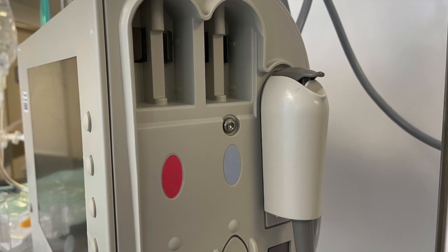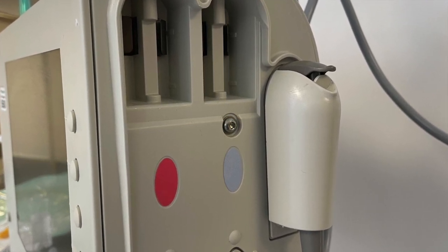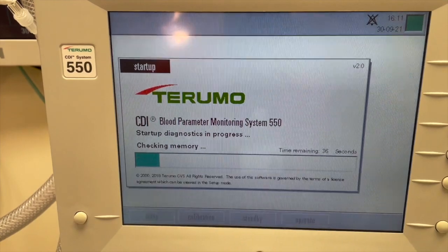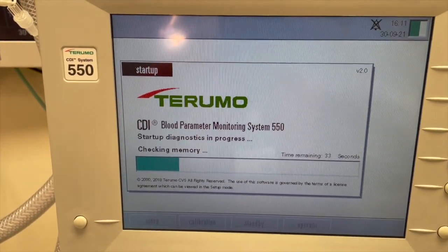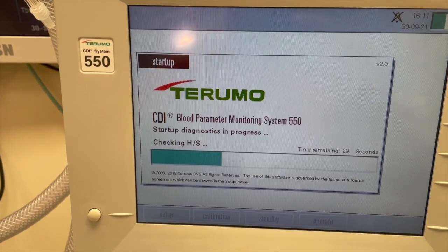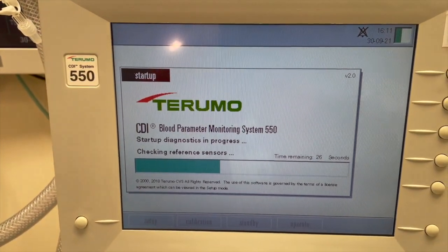Before turning on the monitor, make sure the venous saturation probe is docked in its designated port on the monitor. This allows the system diagnostics and module self-test to run automatically. This test verifies the function of monitor electronics and checks for electronic or optical drift in the module, which could result in calibration failure or reduced accuracy. This check should be done completely and routinely before every use.